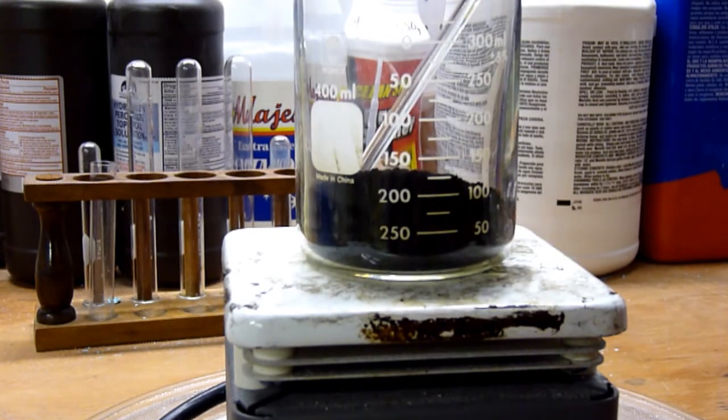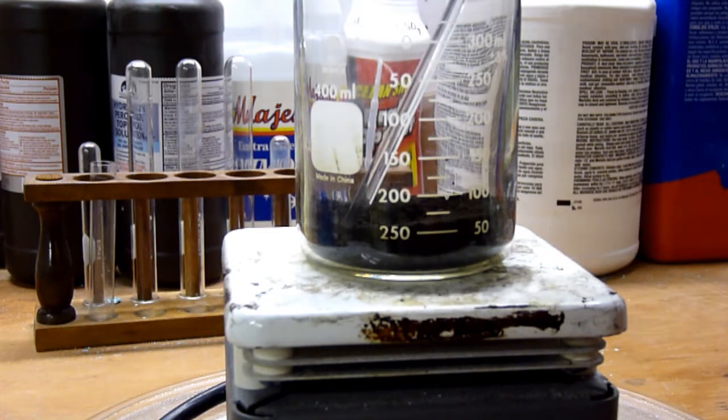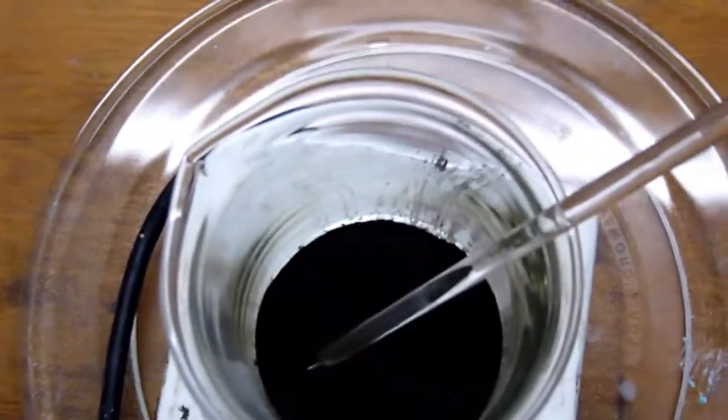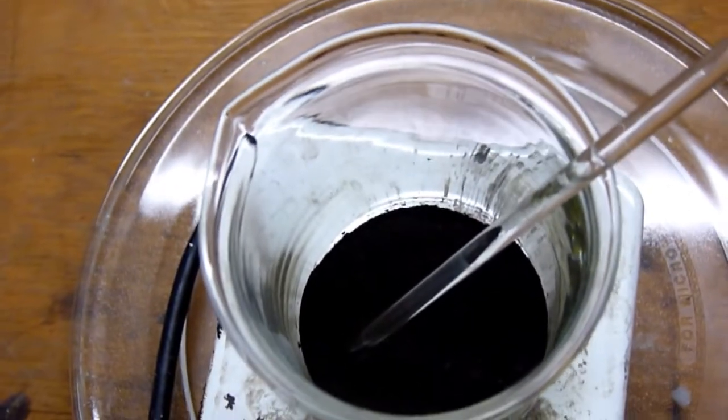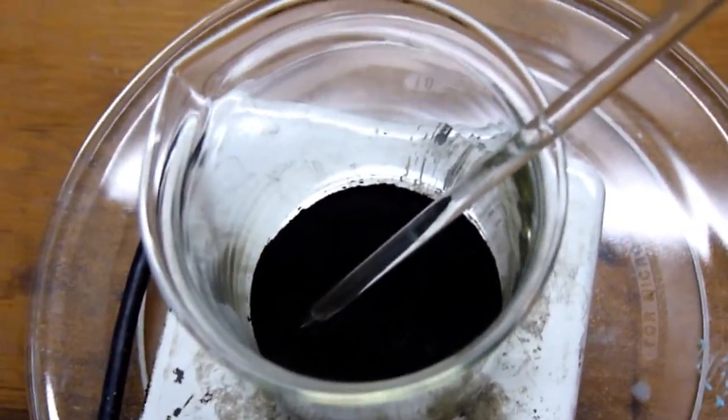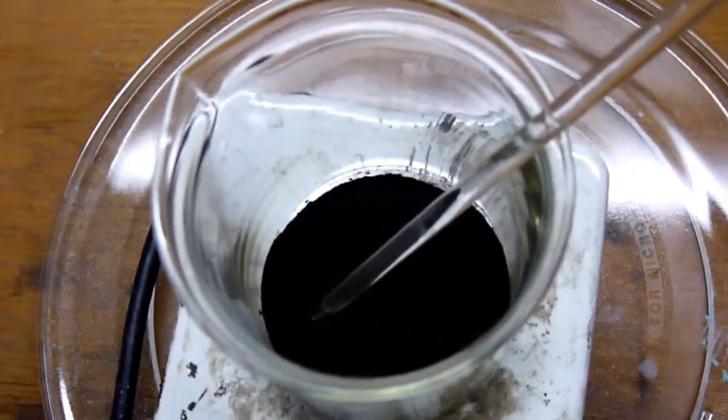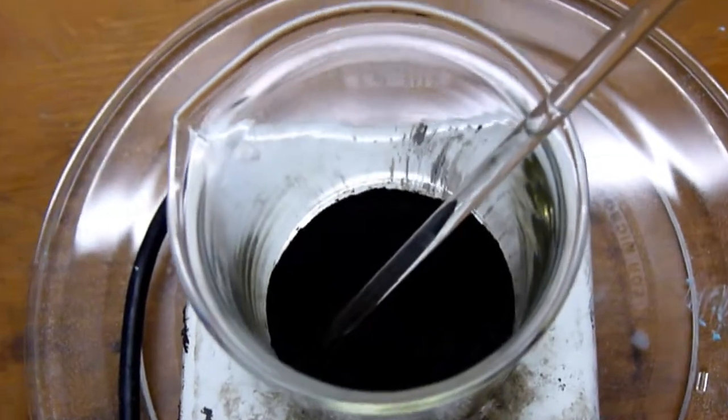Wow that is very hot. So yes. Now we have this copper oxide and all we need to do now is find something to do with it. And I was thinking of thermite. So I think I'll let this cool off and mix it with the appropriate amount of magnesium. And then we can make some thermite and I'll set it off and we'll see if we can recover any copper metal from that.